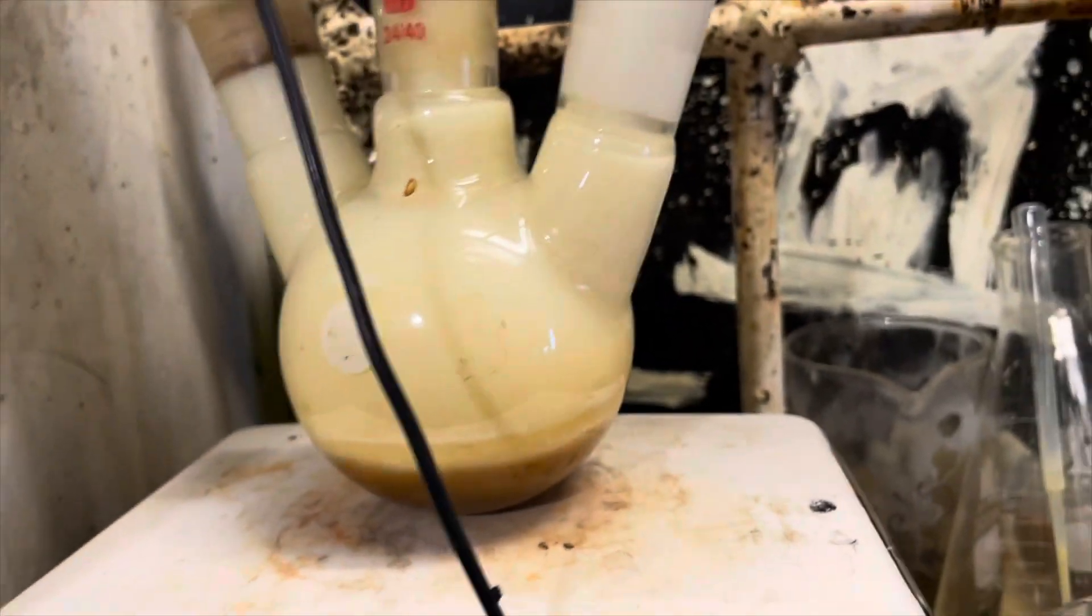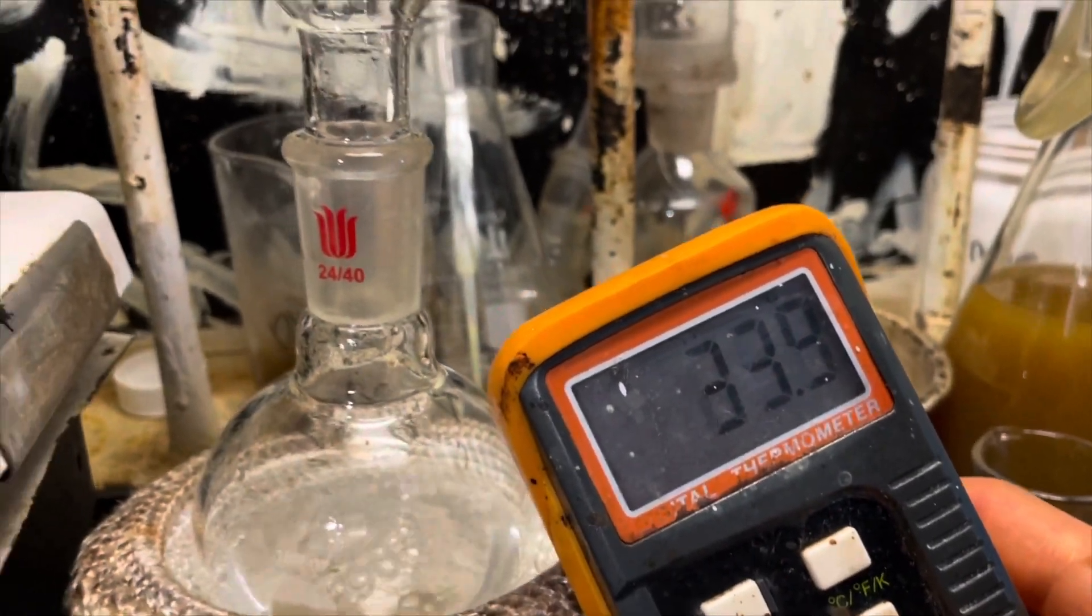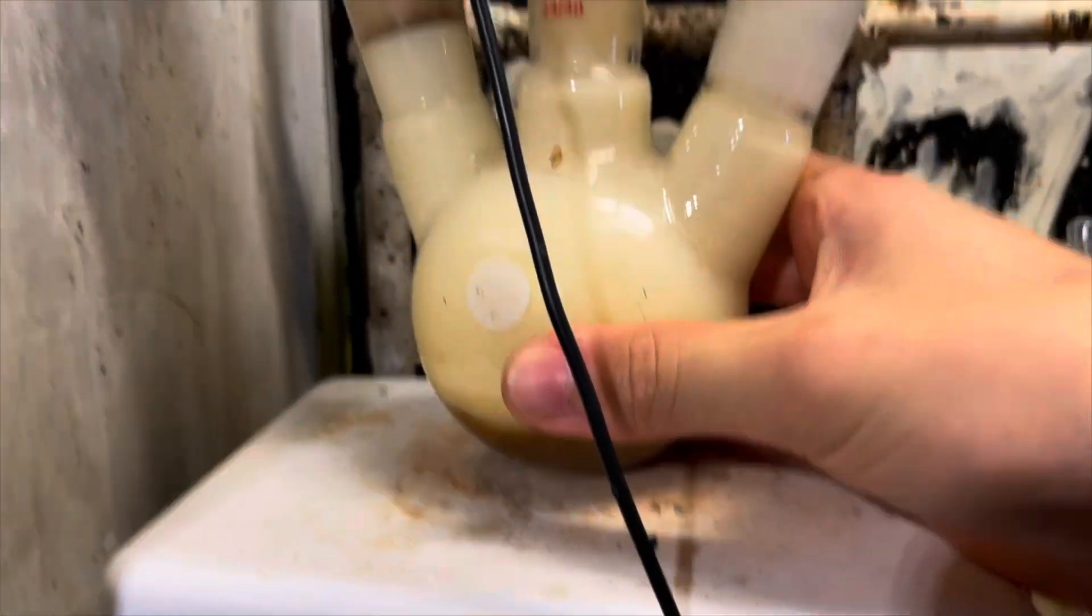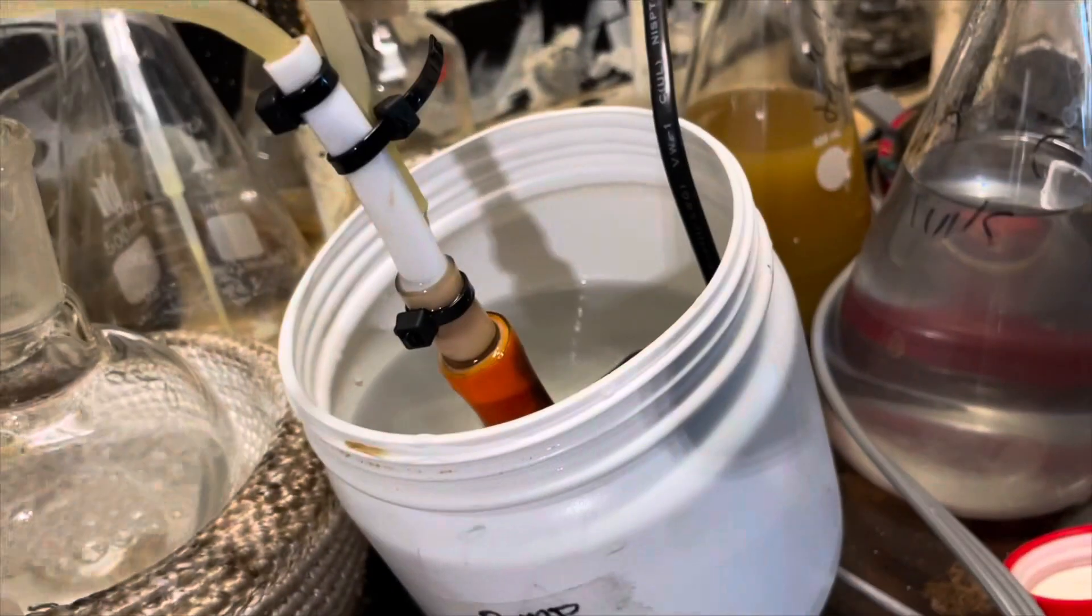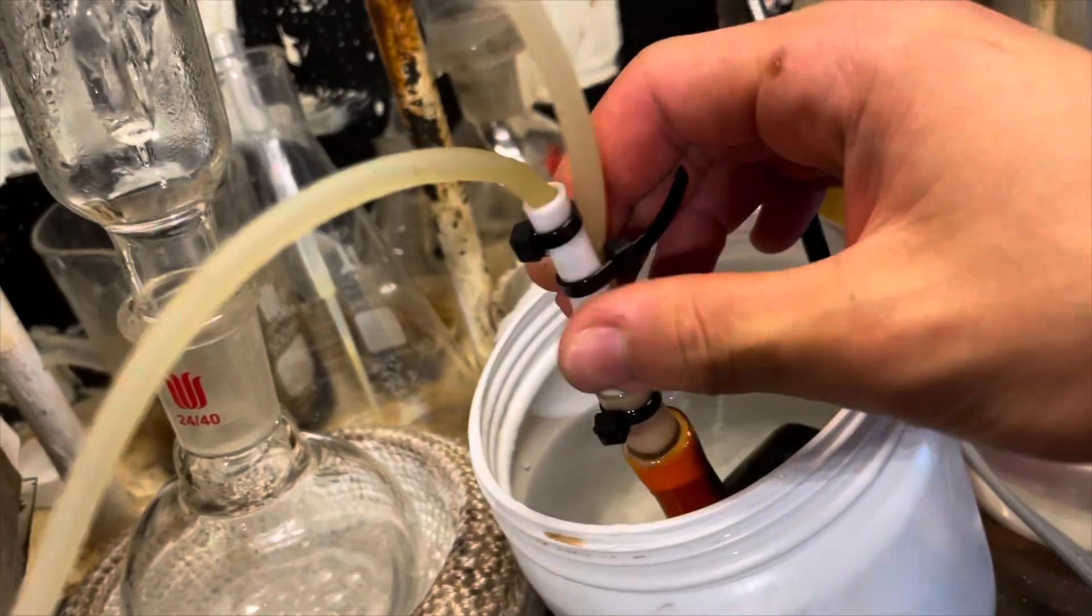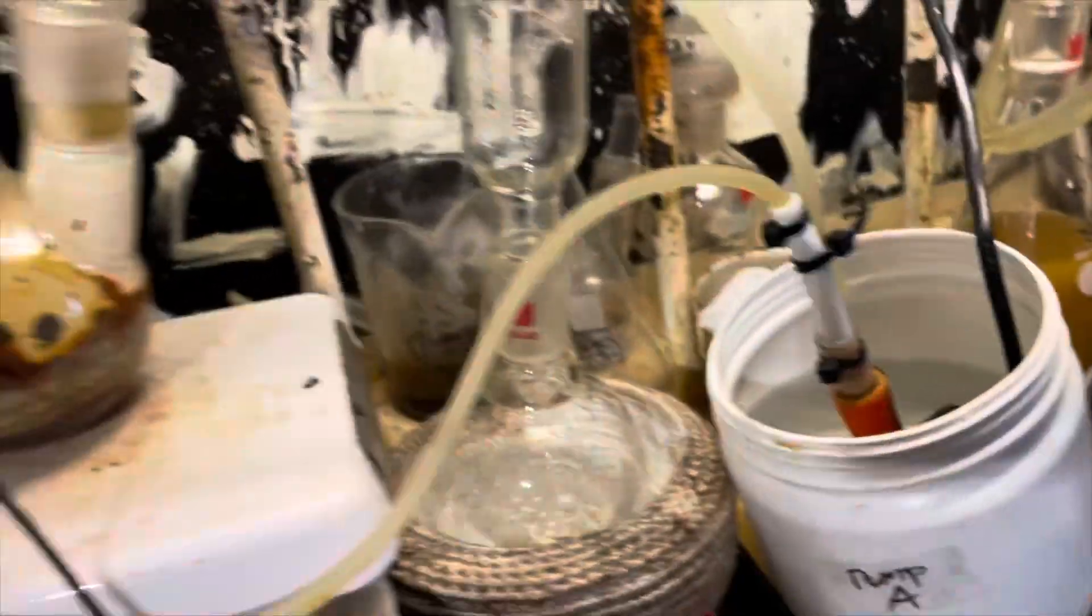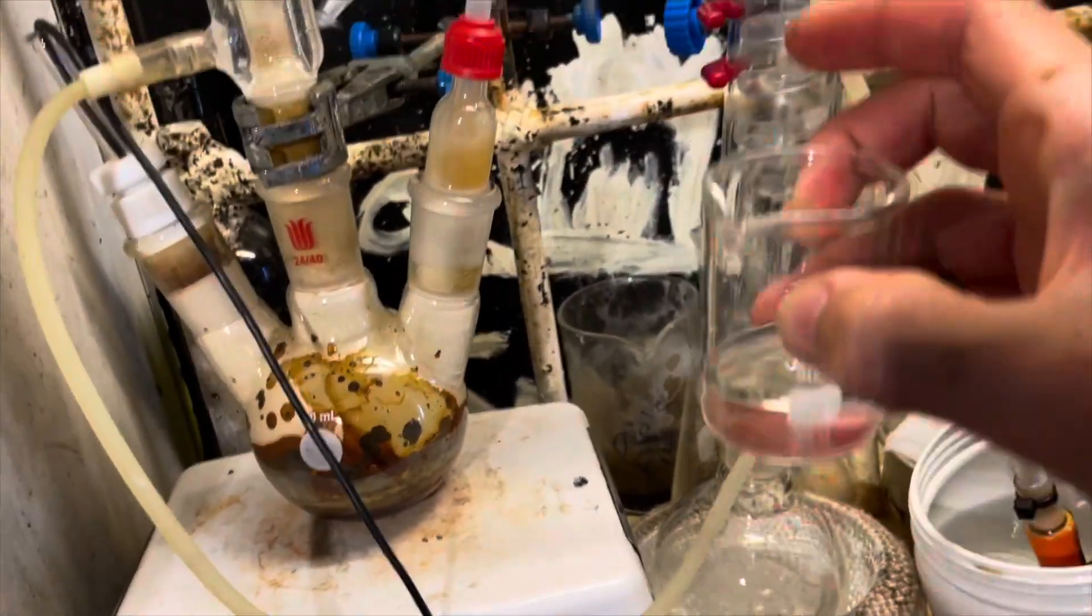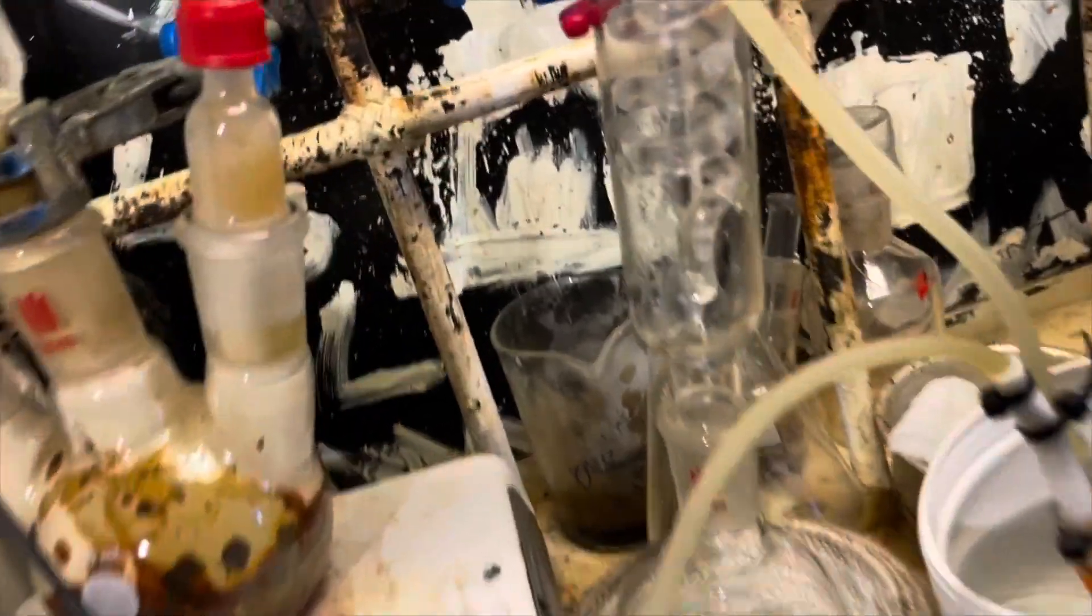Now, you can see we are getting a color, and that's about what I expected. I never got the pink color, though, which is very interesting. The reaction also finished relatively quickly. So that indicated that, of course, it scaled down a lot more. Like, that's a 250 mL flask there. It's not even halfway. It's probably around one-fourth of what Tom did.